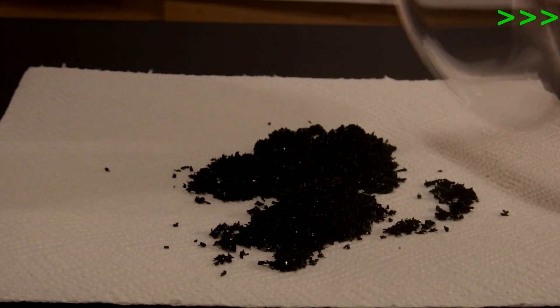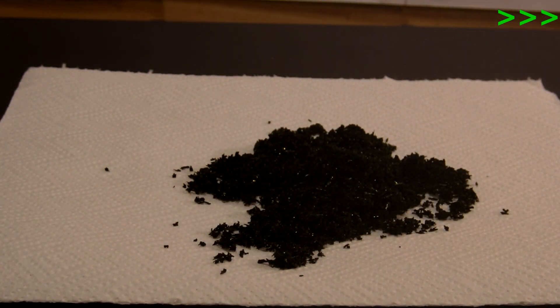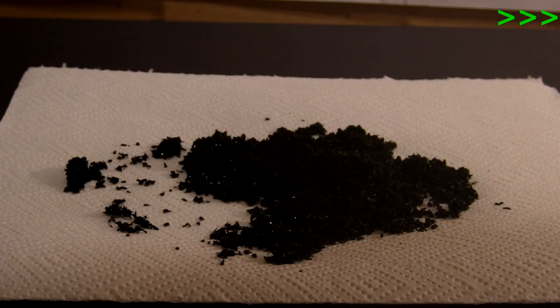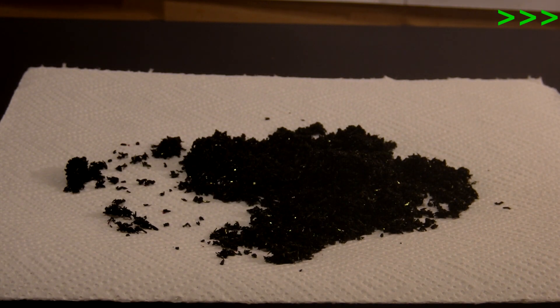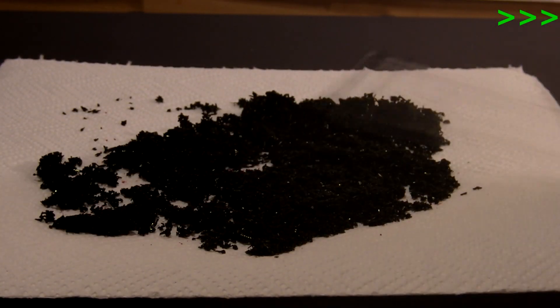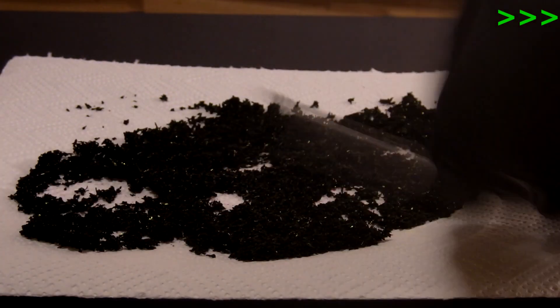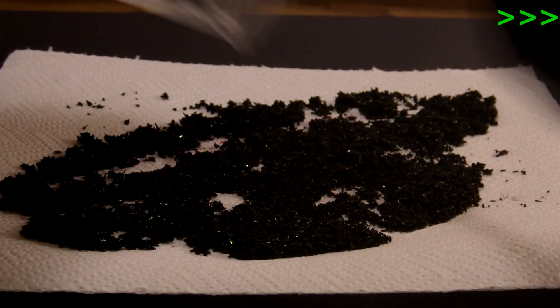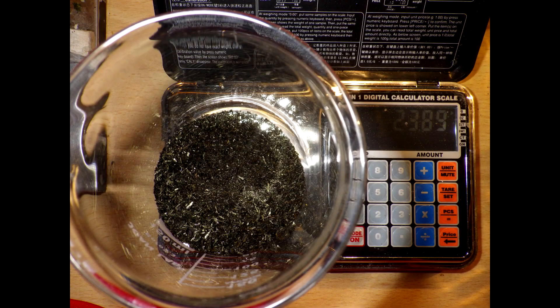Semi-dry crystals are dumped out of funnel and put in warm place to dry. Organic stuff like paper is not the best choice, but it is fine.